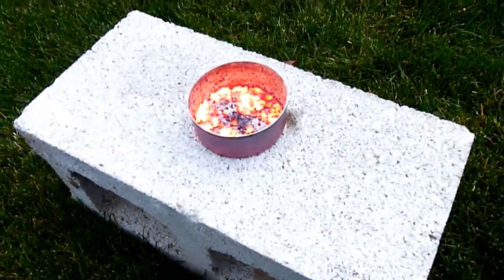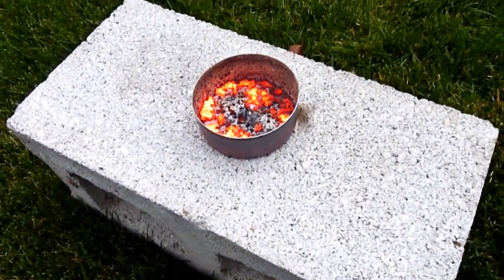And there we have the globules of white hot molten copper in the bottom of the can.